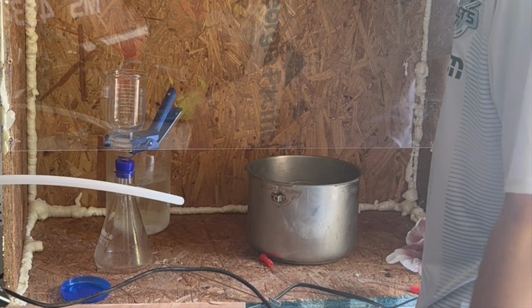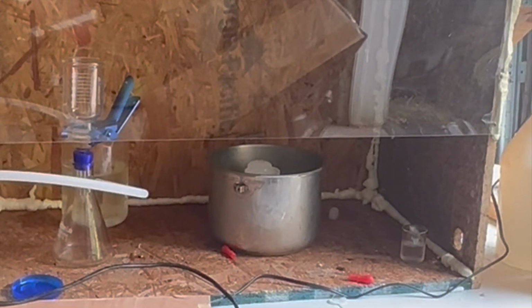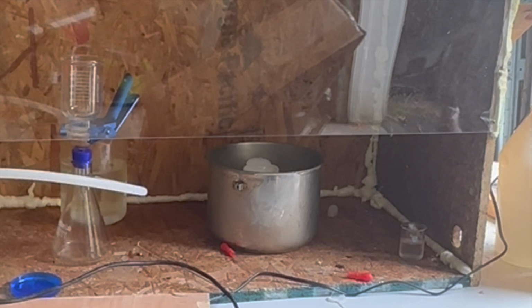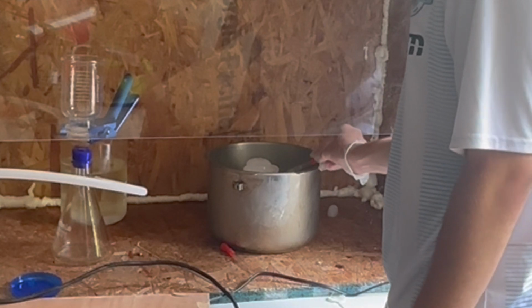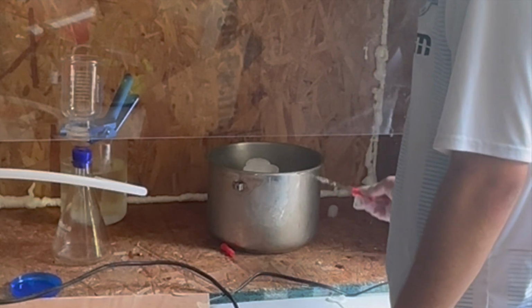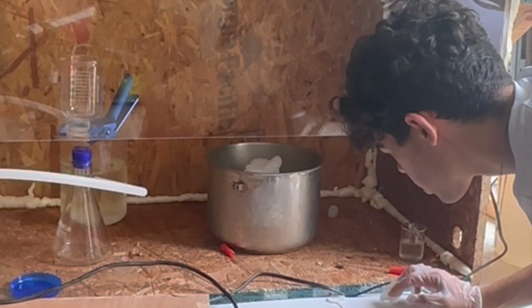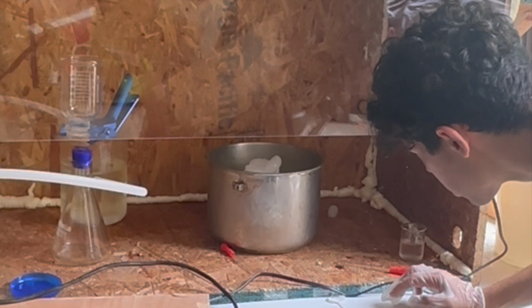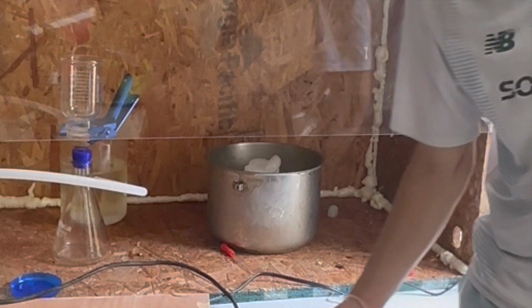So what I might do, let's see what happens if I put a plate over it. So what I did was I got kind of a top to a crucible and flipped it over, put it on top of the beaker, and then I put some ice cubes on it to condense the iodine gas. I think it's coming out, or at least some of it. Oh yeah, it's working. There's a drip of pure iodine coming off the tip of the thing. Look at that.